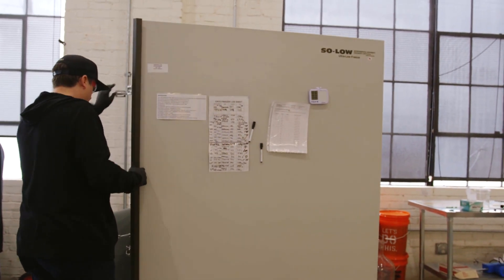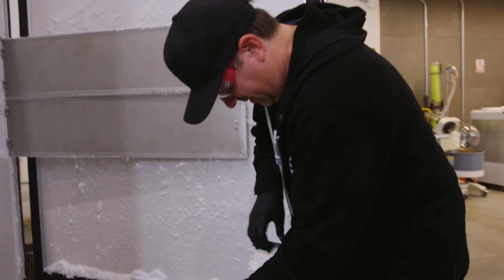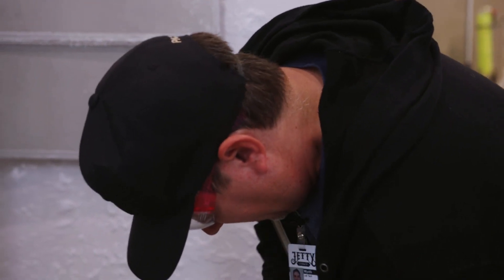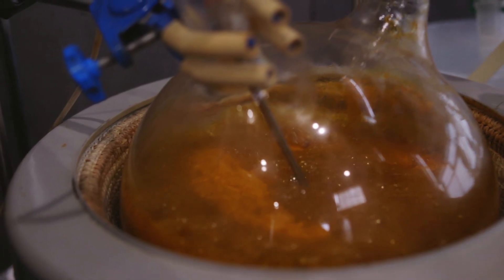Let's go ahead and take a look at the material I've got. So this is frozen overnight. It's very spongy, as you can see. What I'm going to do is basically crush that up and then take that powder and load it into my boiling flask.